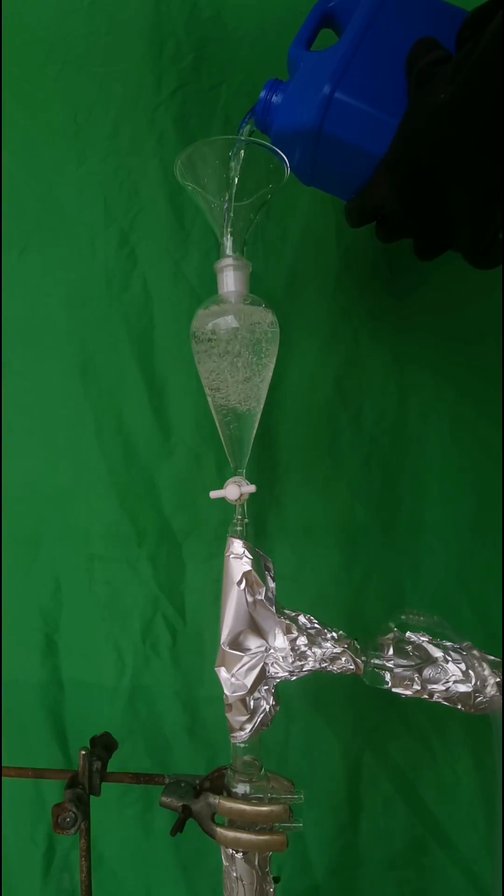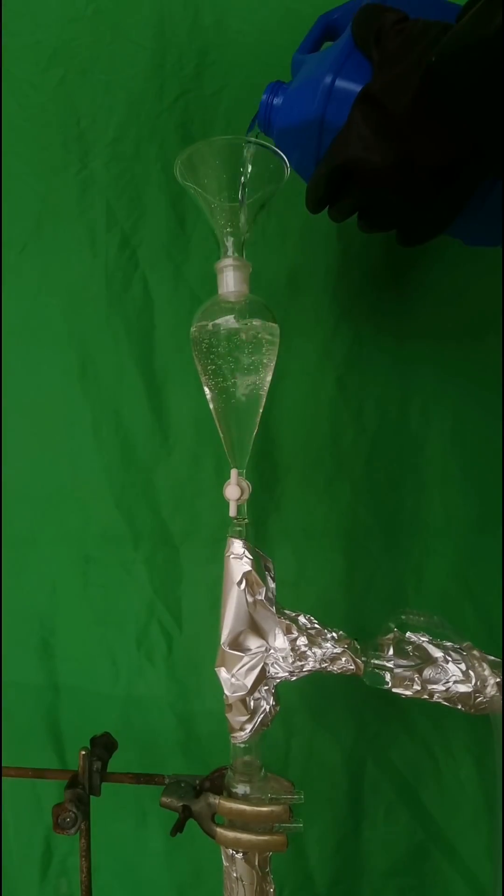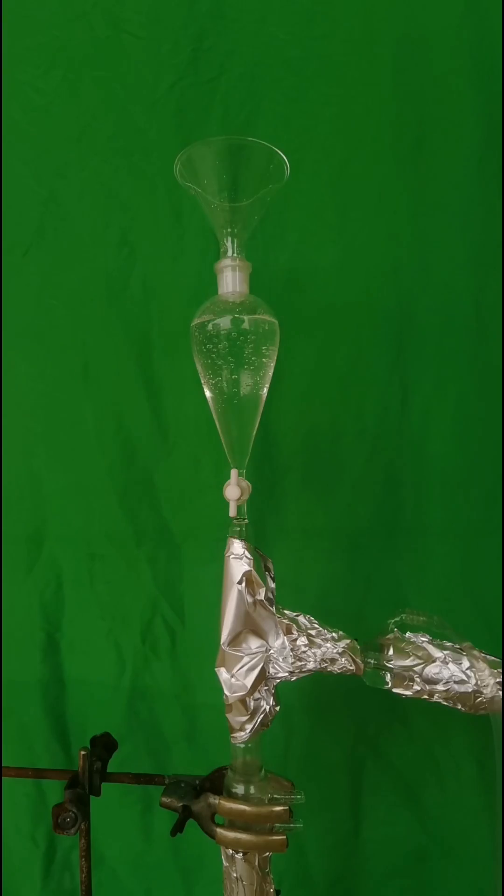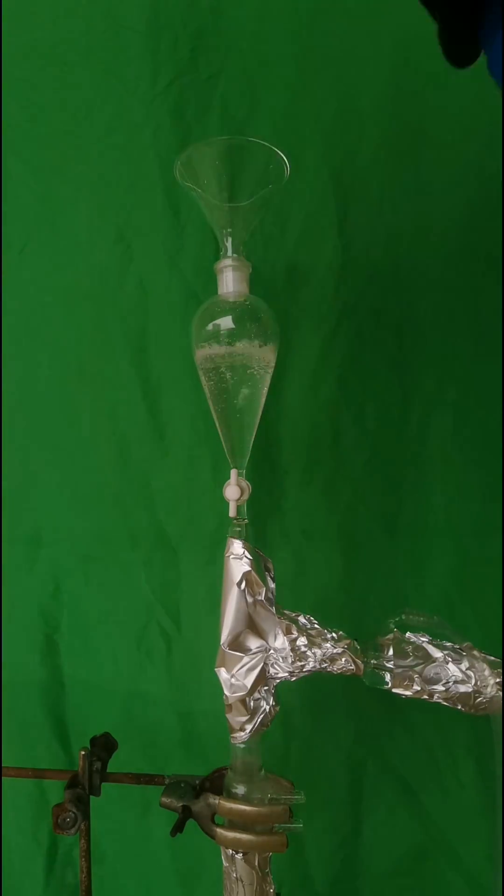Today, I will make 98% hydrogen peroxide. At first, I pour some 50% hydrogen peroxide to the funnel.